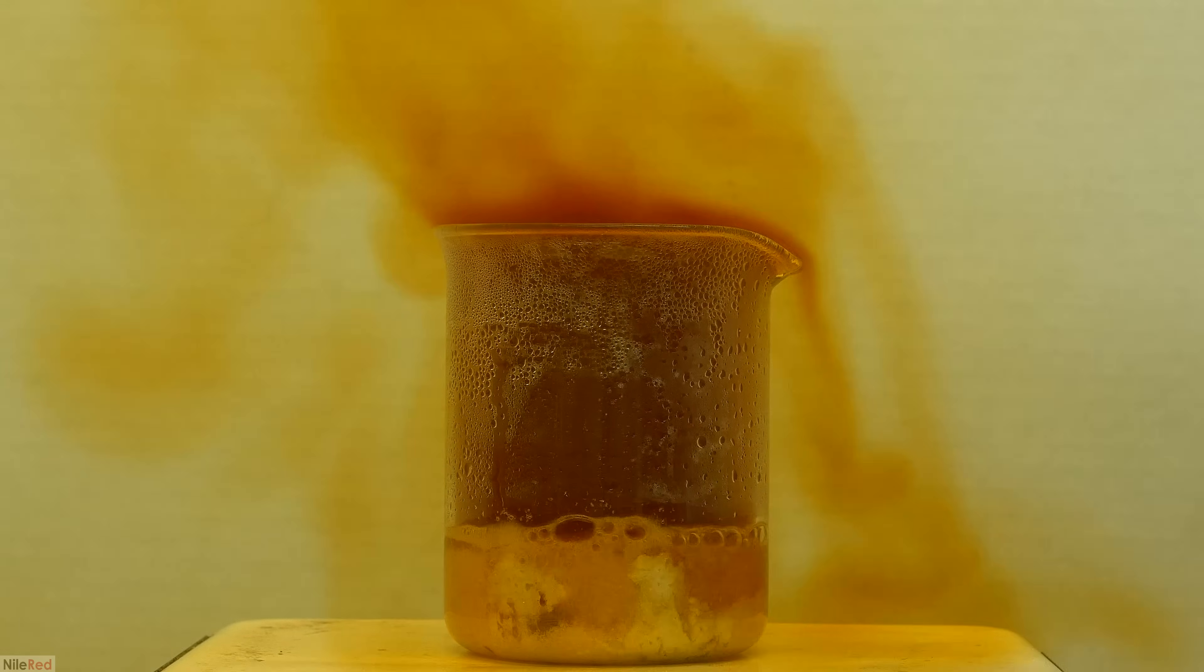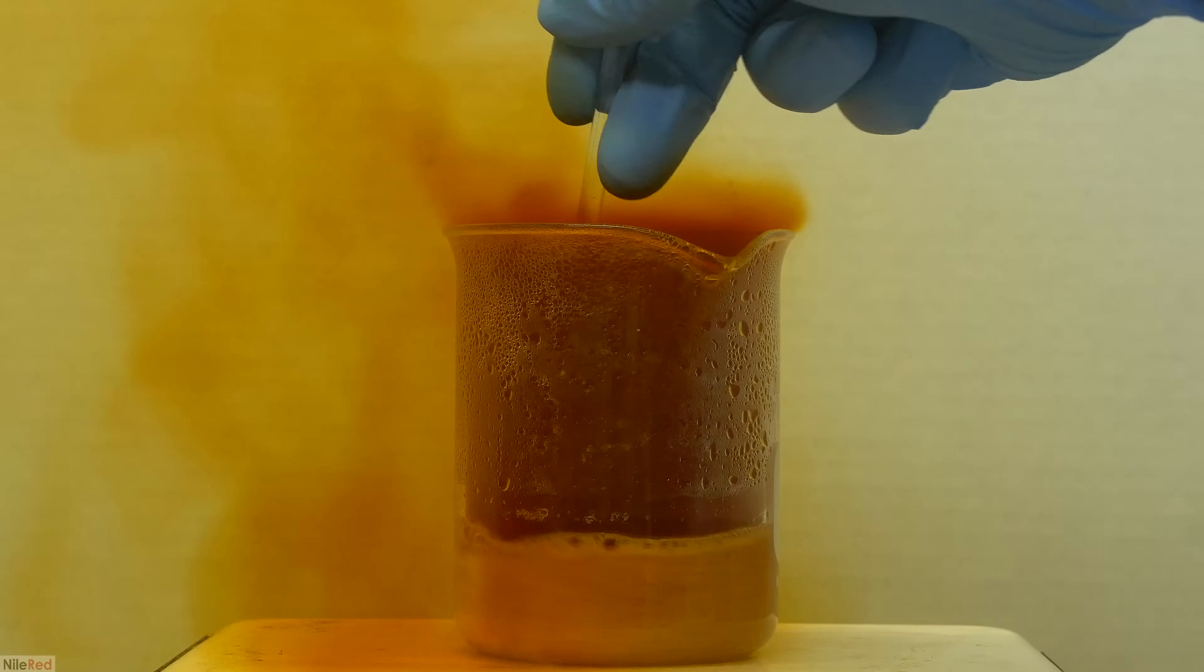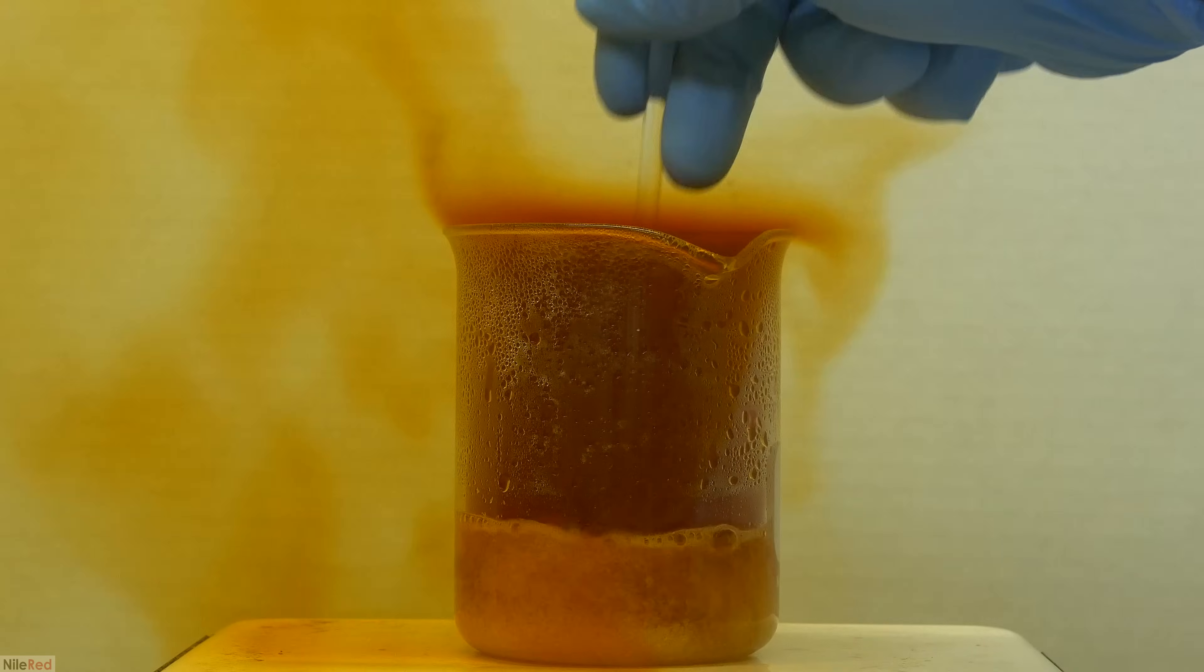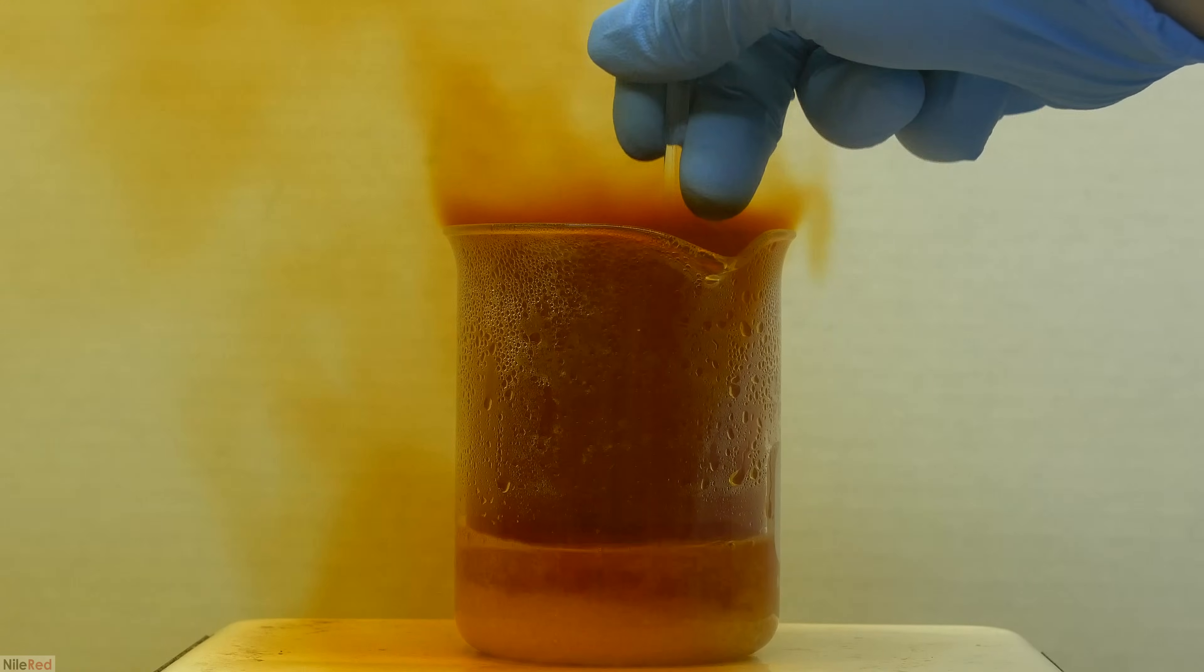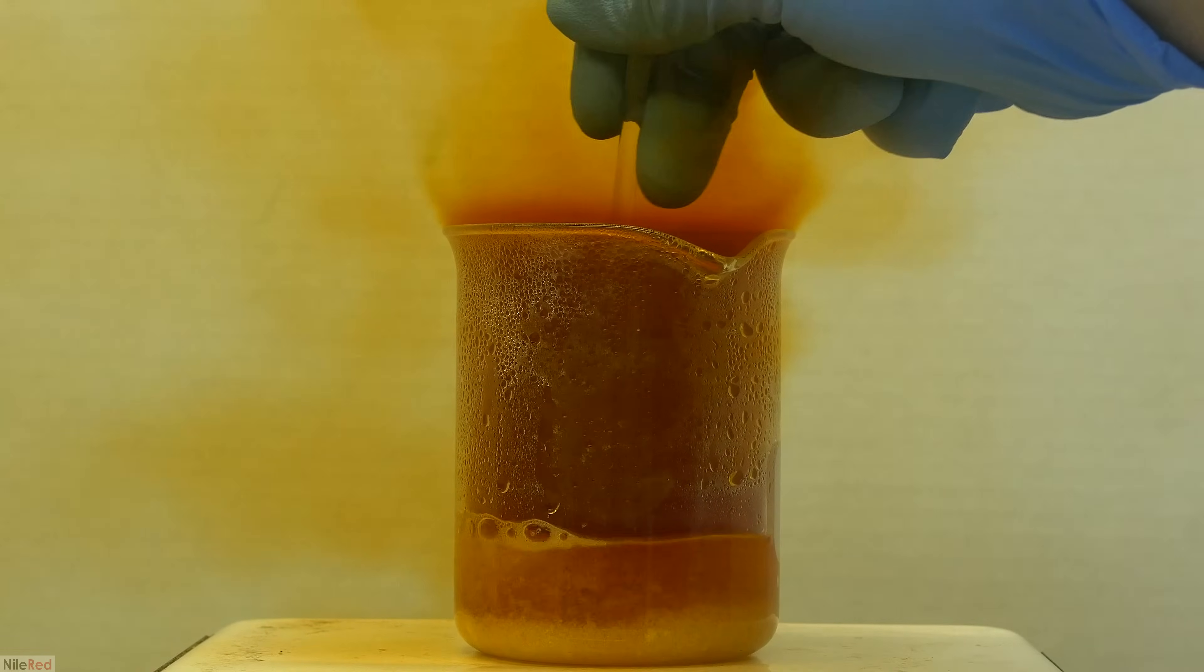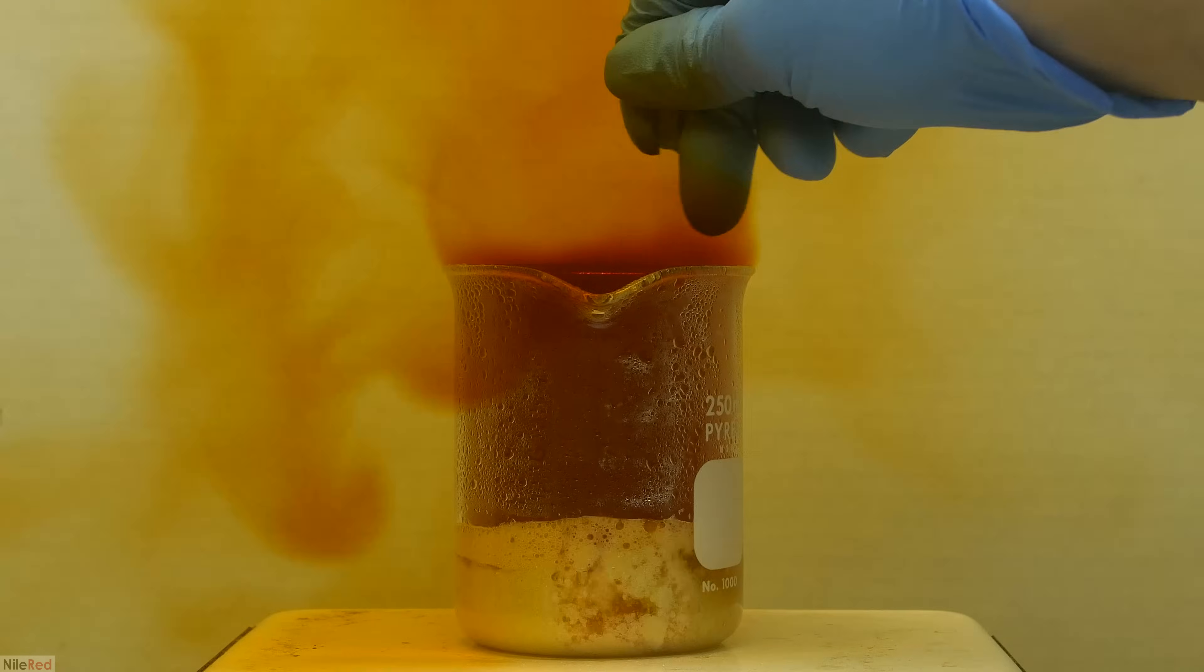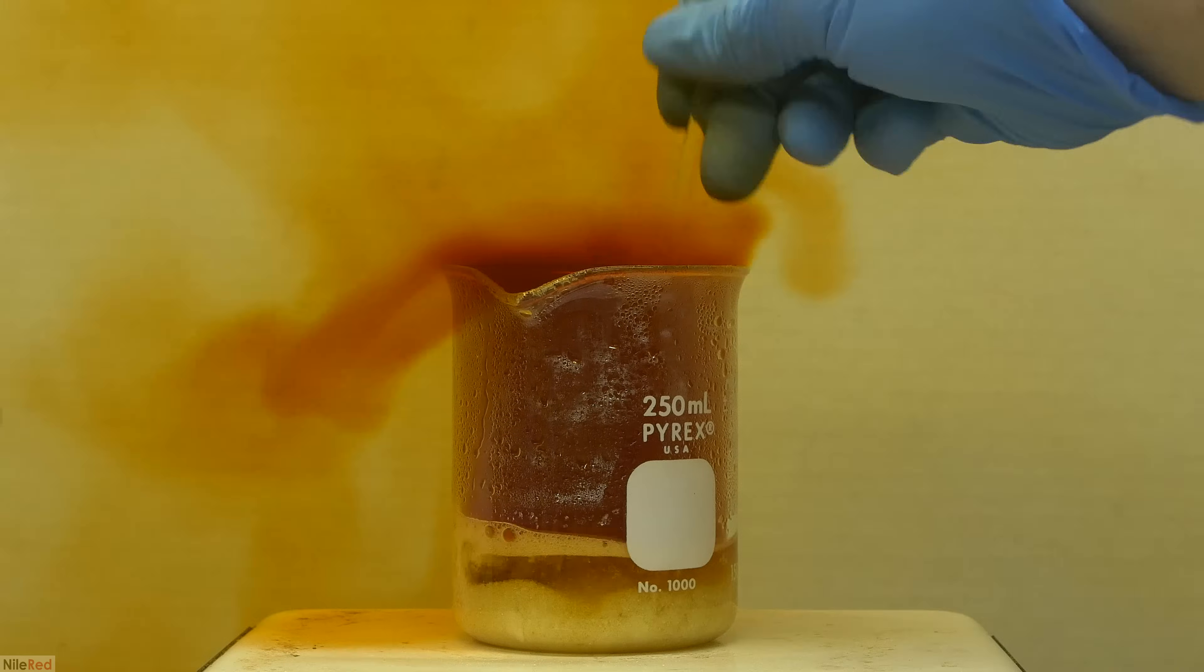As the silver continues to react, we'll be building up some silver nitrate and it's important to occasionally stir things. I'm not exactly sure why, but initially it seems like the silver nitrate has a hard time dissolving. I think we might just be producing silver nitrate faster than it can dissolve into the water, but I'm not exactly sure.